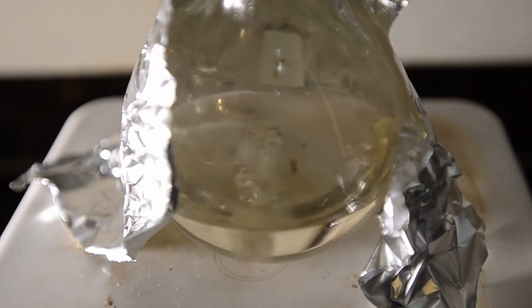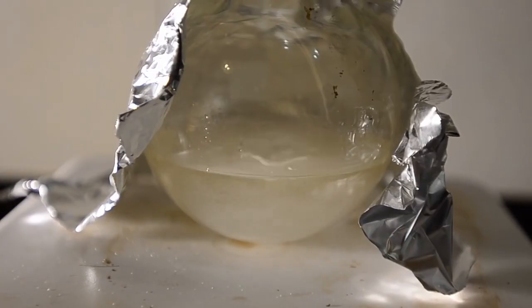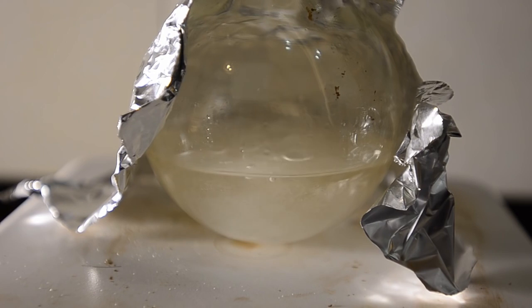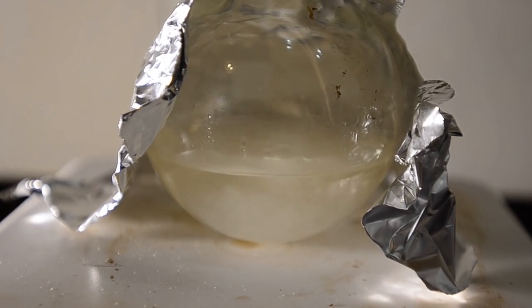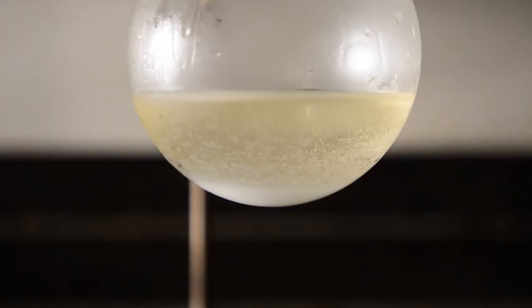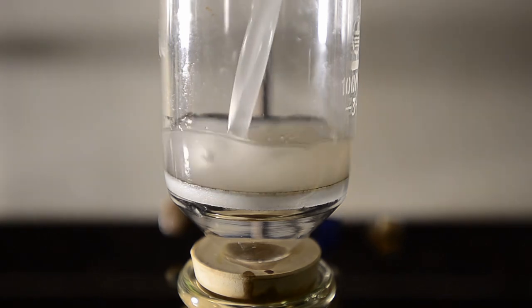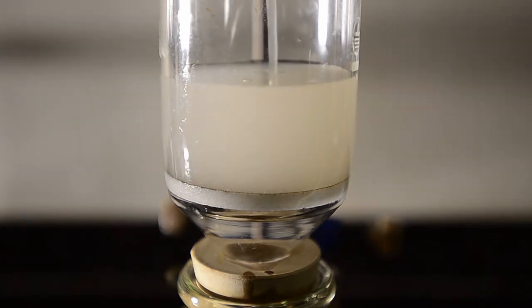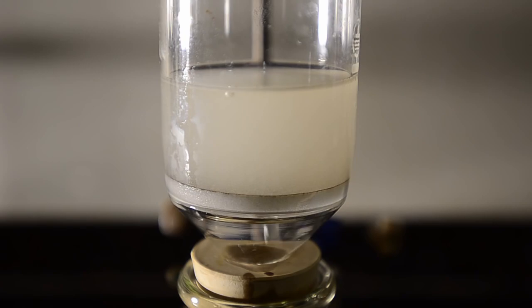At this point we noticed a white precipitate, presumably more sodium chloride, forming in the boiling flask. So we allowed the mixture to cool at this point and chilled it down again to zero degrees. Once again we filtered this on a vacuum and we noticed that the liquid was now actually quite viscous and syrupy.